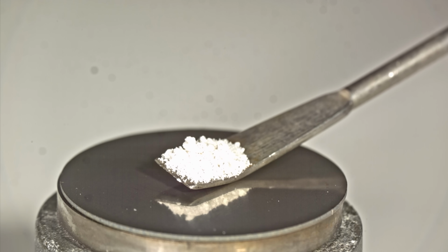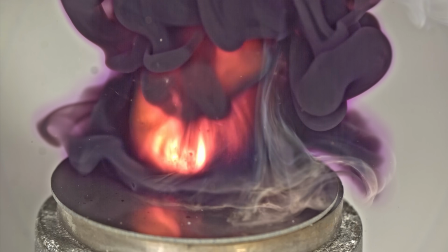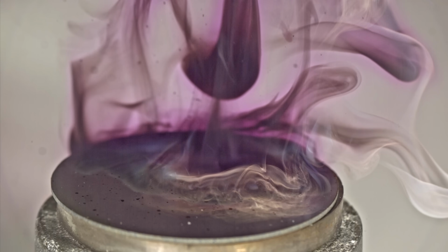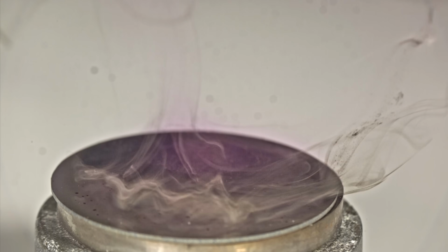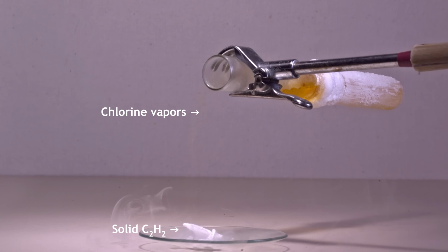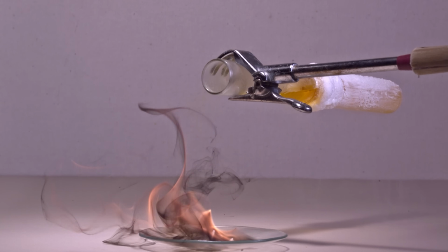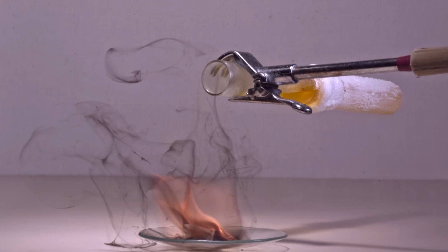And this is how diiodoacetylene behaves when poured onto a heated surface. Diiodoacetylene is also shock sensitive and will explode on impact. Frozen acetylene is extremely flammable and will ignite on contact with chlorine vapors. Now let's take a look at the reaction between solid acetylene and liquid chlorine in slow motion.